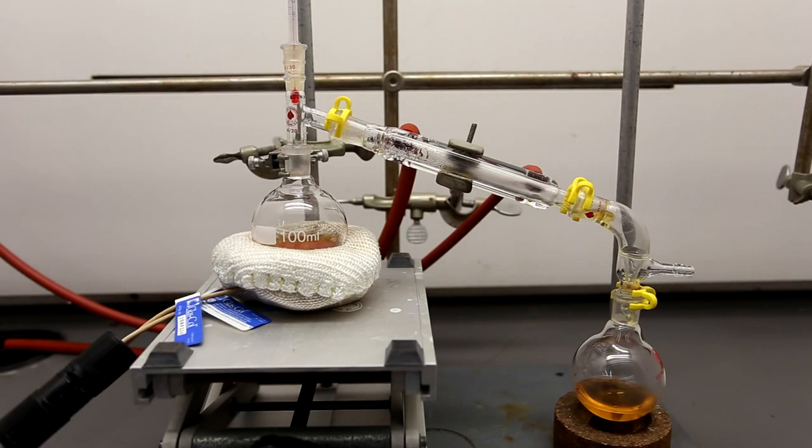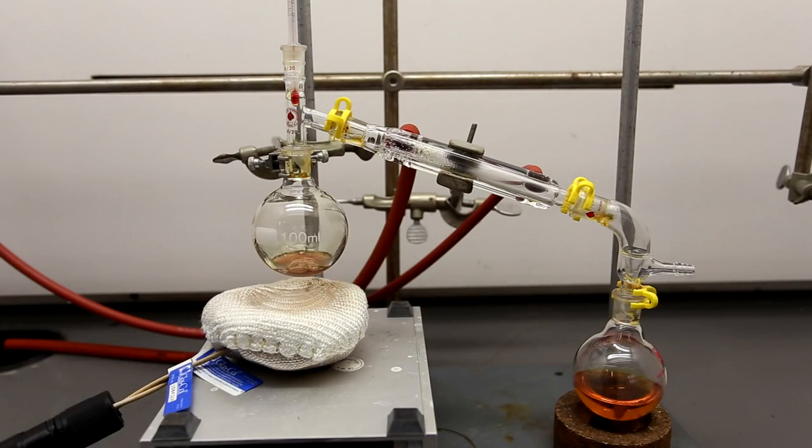At this point, you can replace the collecting flask and boil everything over, or simply remove the heat and collect the nearly pure 57% hydriodic acid that remains in the boiling flask.